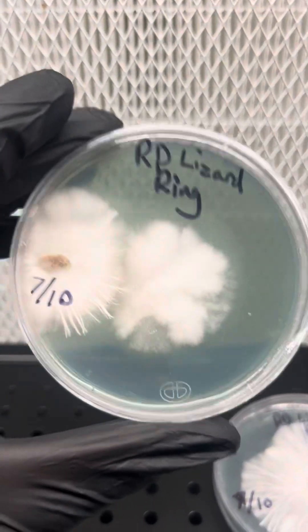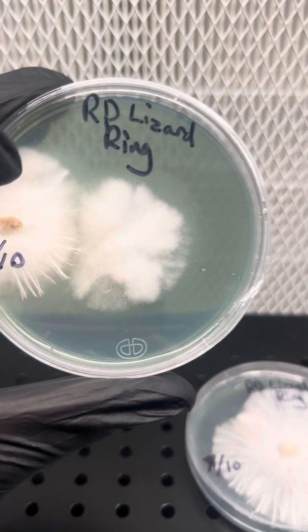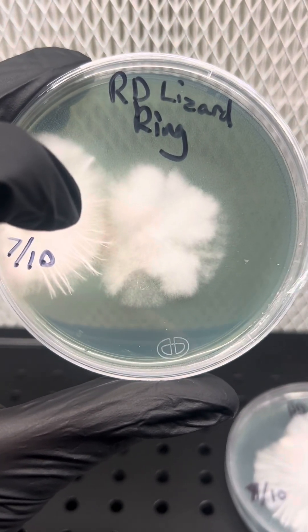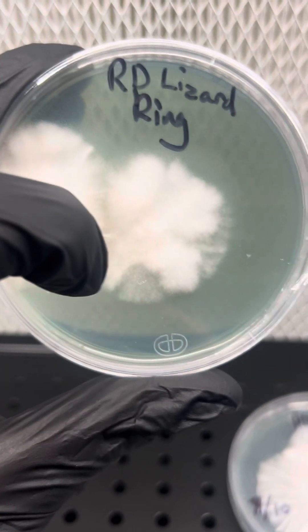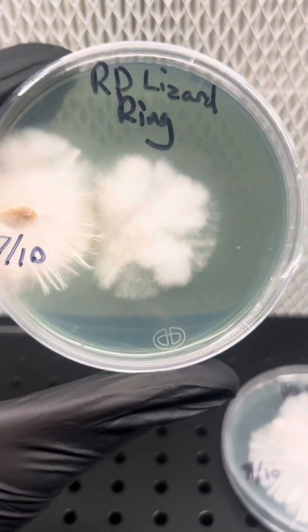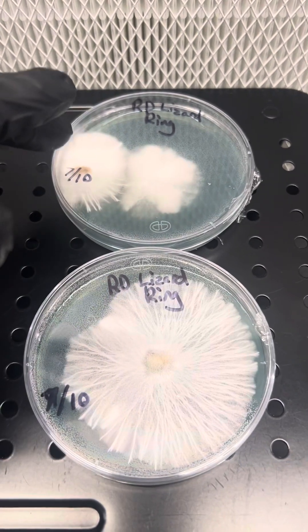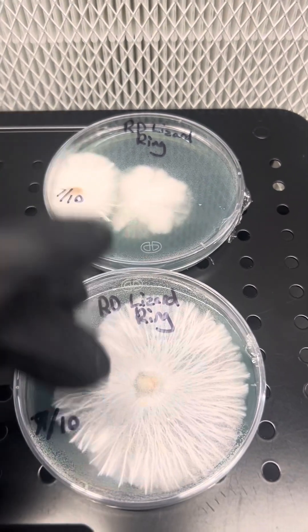But it usually looks like this. This is another tissue sample that I took — same tub, different mushroom — but you can tell that we're getting rhizomorphic growth. This is where agar transfers play a huge part. I will cut a wedge out of this area right here where I'm seeing very nice growth, in hopes that I can pull off something like that. All in all, this is taking a tissue sample and trying to clone the mushroom.